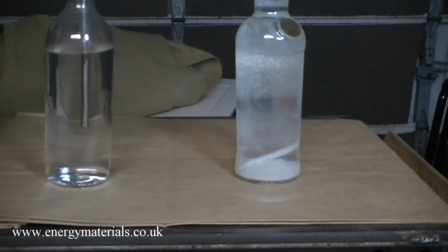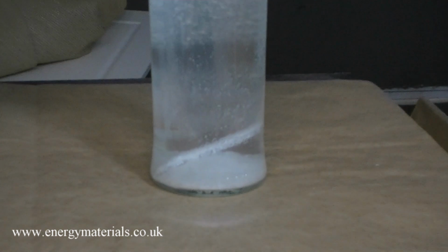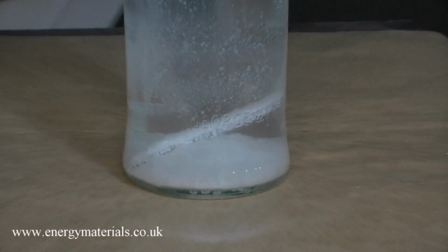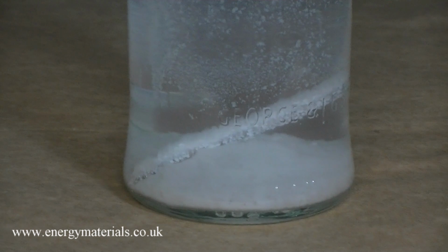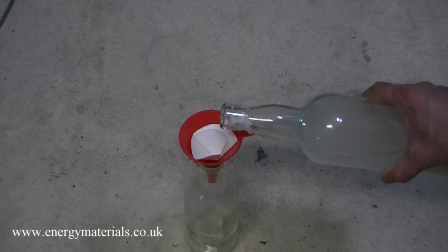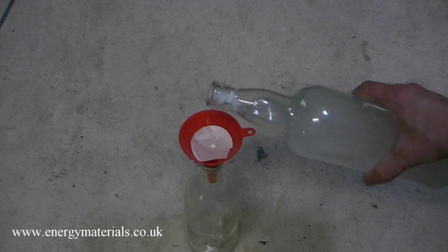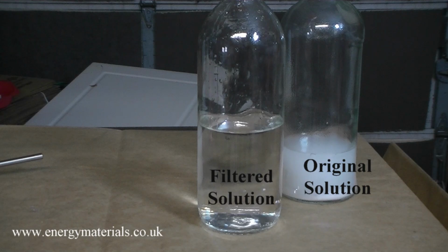Eventually our magnesium finishes reacting with all the hydrochloric acid in solution, and now we are generating a white deposit which is magnesium oxide. Magnesium oxide is not soluble like the magnesium chloride in water, so to remove the magnesium oxide, the solution is filtered. The filtered solution is clear and colorless.